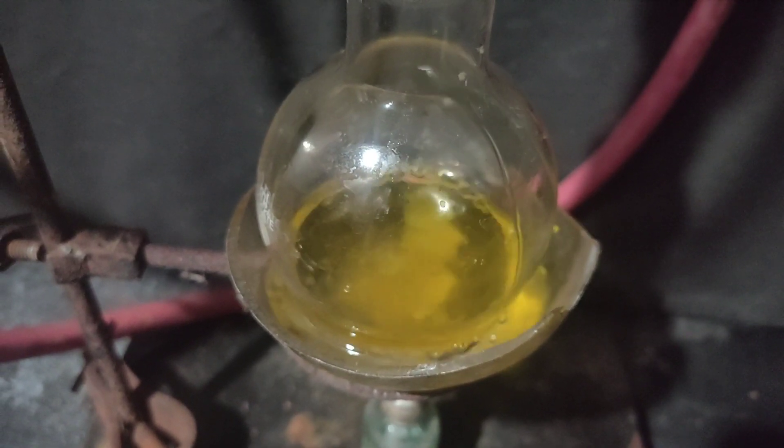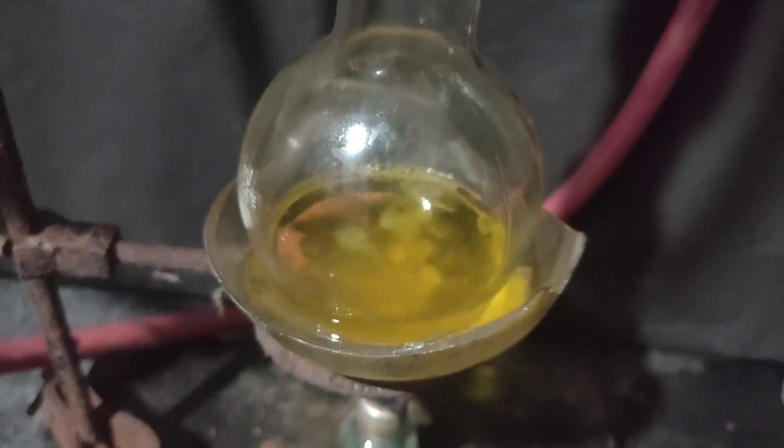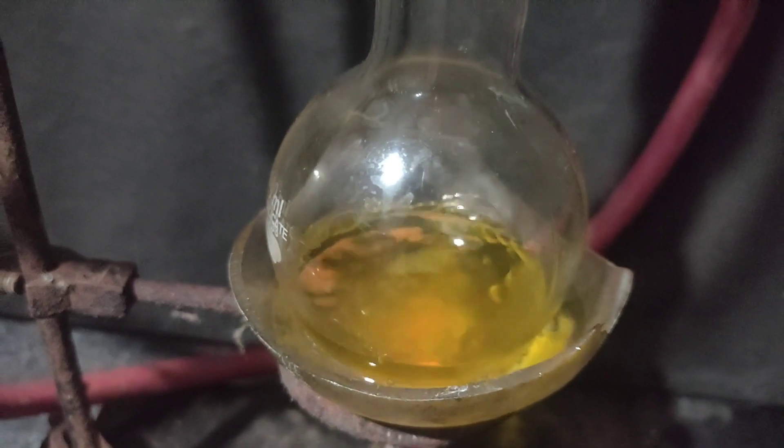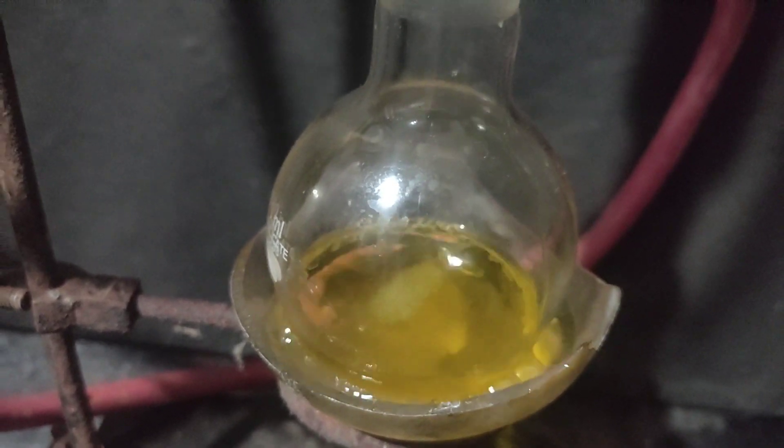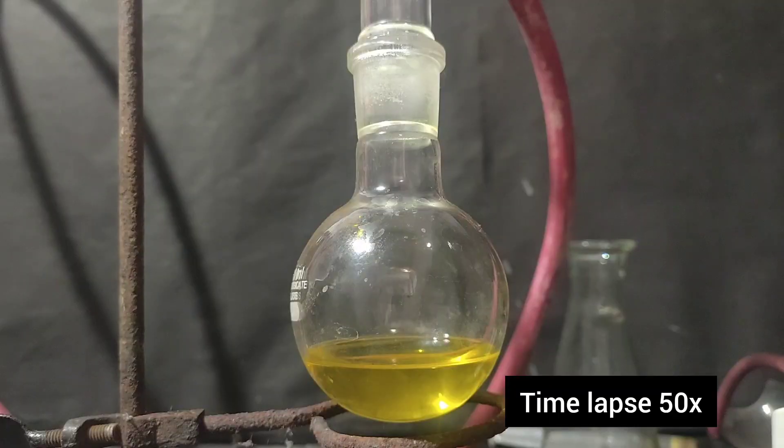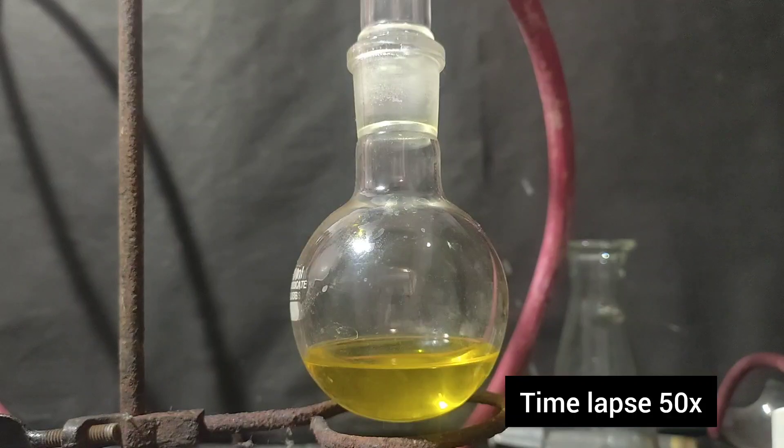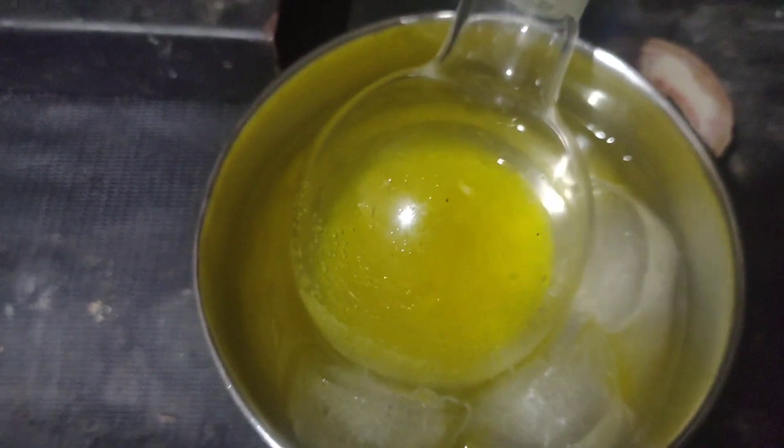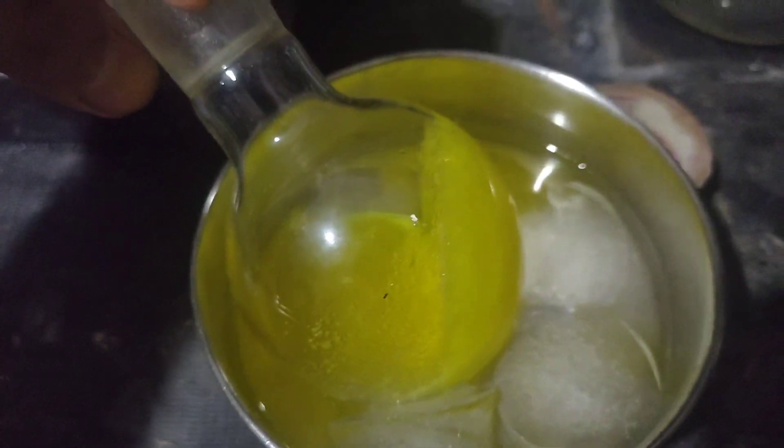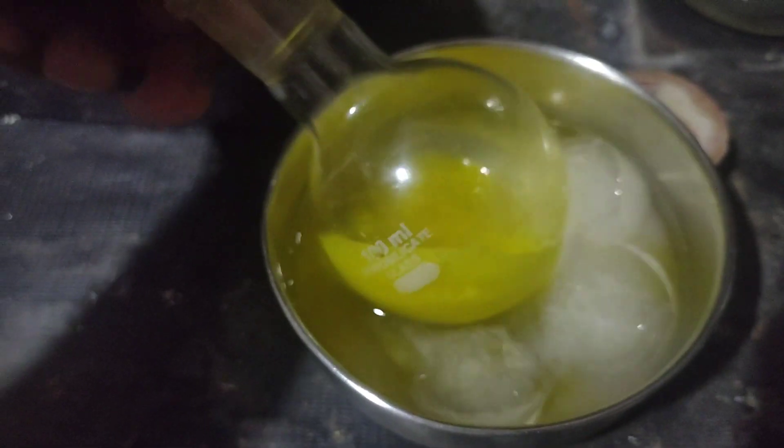On heating, the meta-dinitrobenzene dissolved in the ethanol. When all the meta-dinitrobenzene dissolved, the flask was cooled at room temperature. I kept the flask in the ice bath to precipitate most of the crystals of meta-dinitrobenzene.